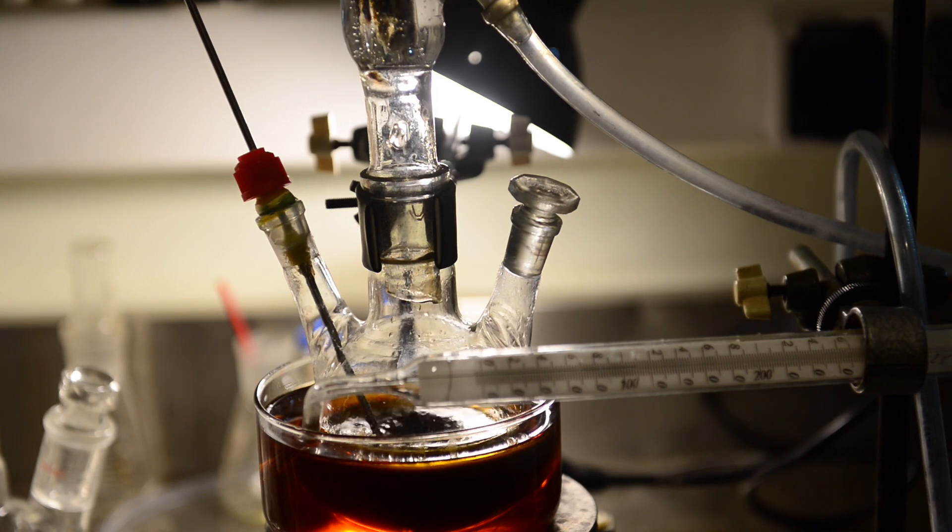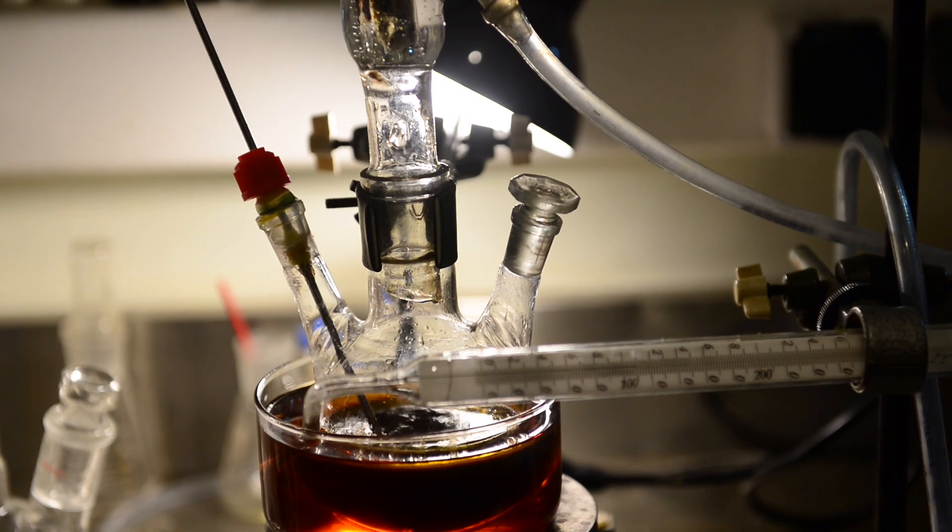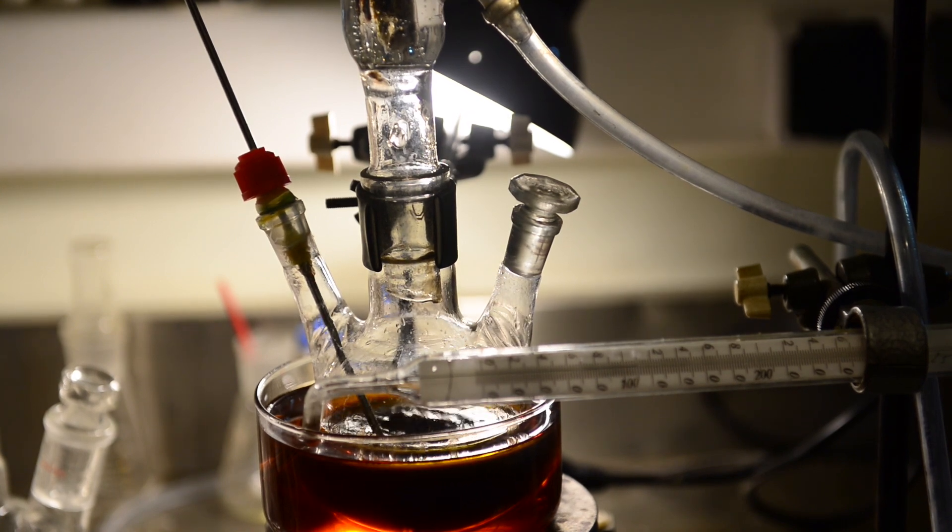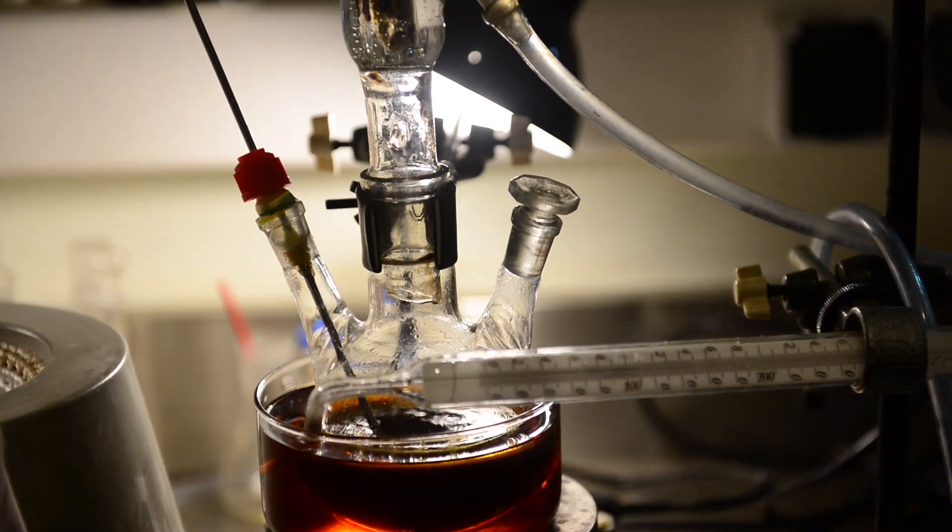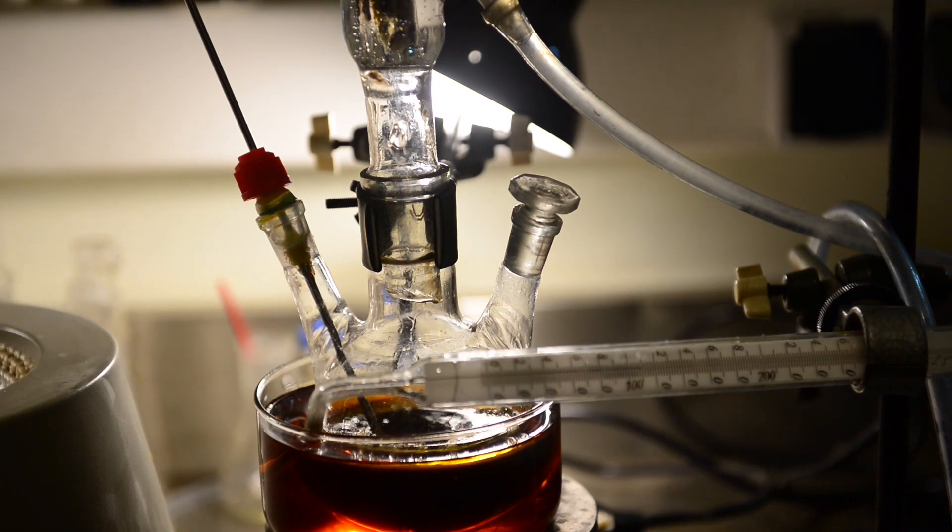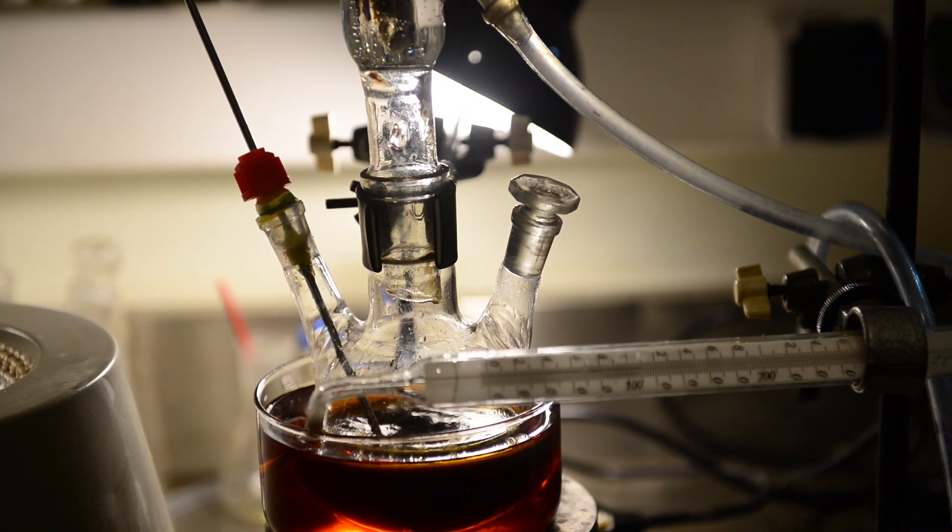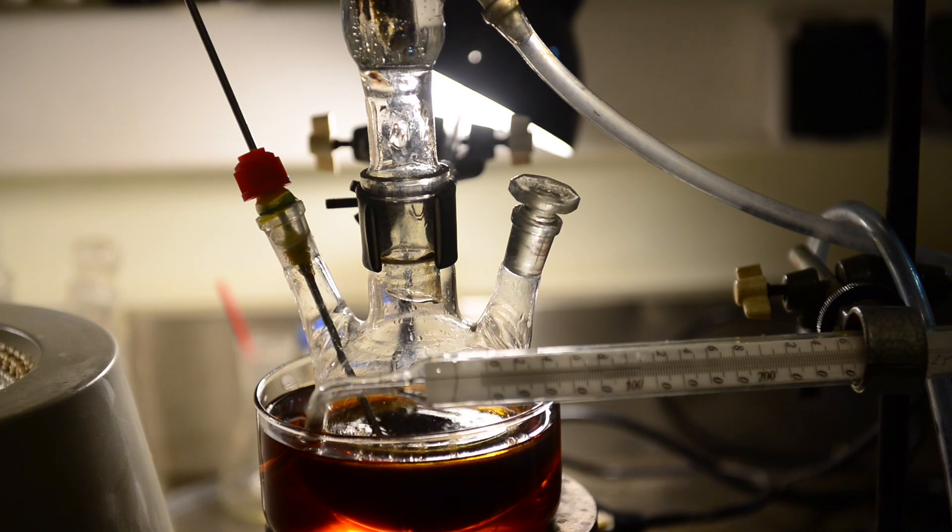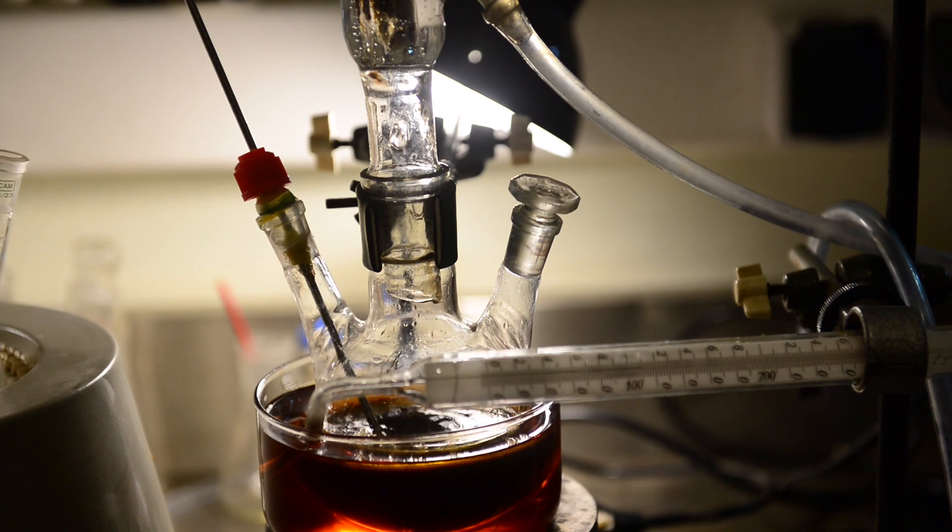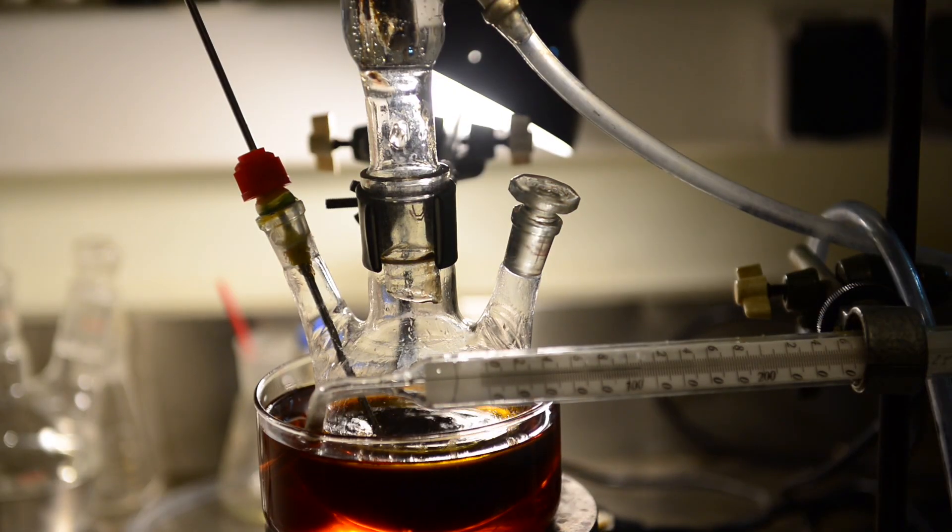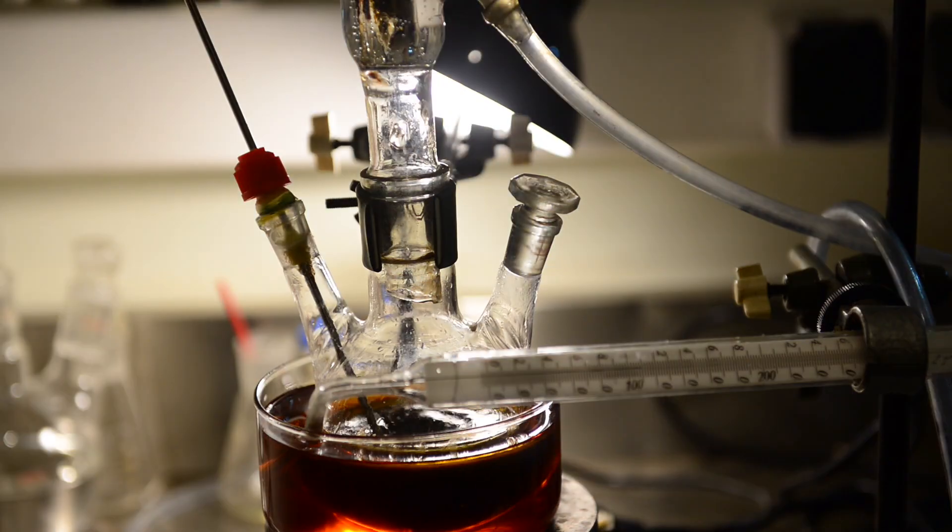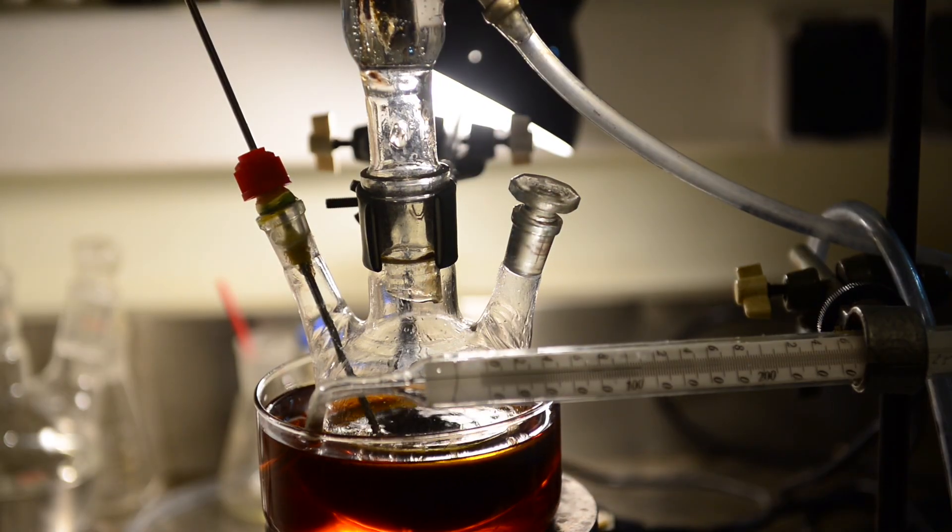We have been maintaining the reflux at 110 degrees Celsius. After the reflux we are going to change the setup and then we will change to simple distillation.